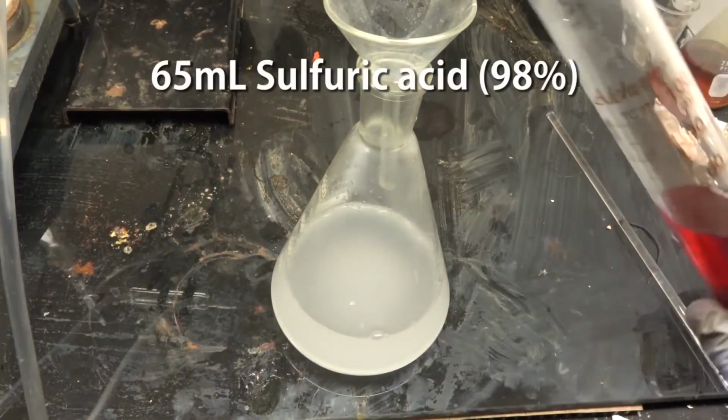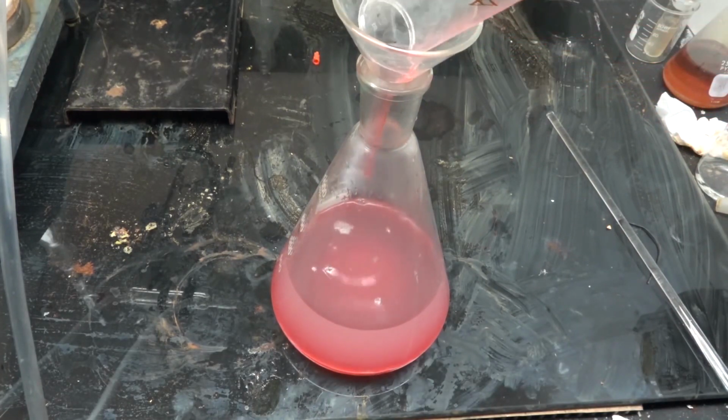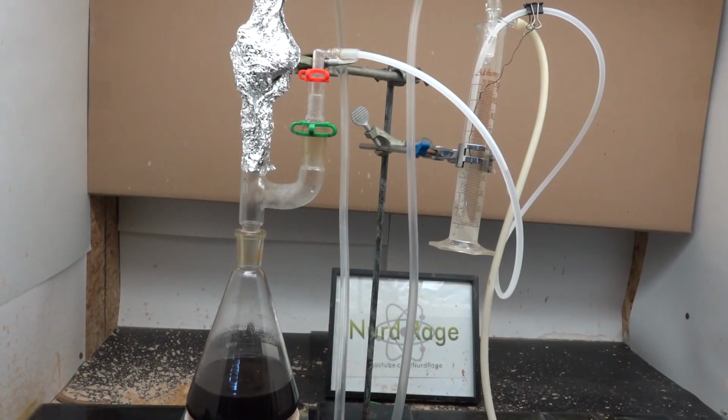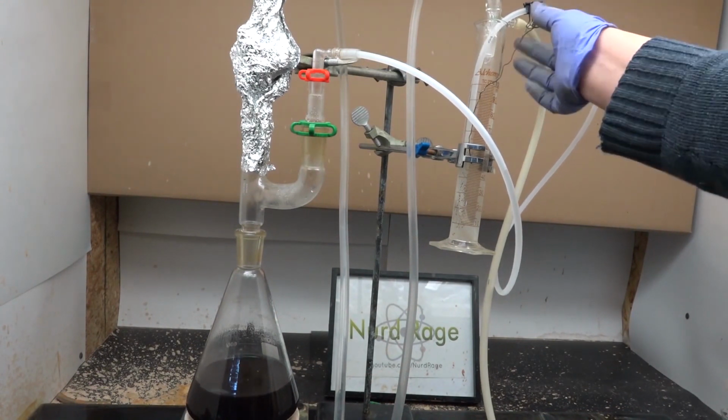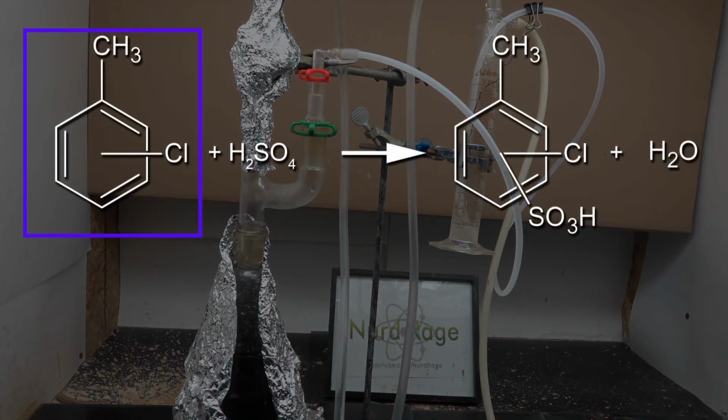Now add about 65 milliliters of concentrated sulfuric acid. This corresponds to a 1/3 molar equivalent. Now set up a Dean Stark apparatus around the flask operating in heavy return mode. Now turn on the heating to 300 degrees Celsius and let boil. What we're doing is sulfonating the chlorotoluene and releasing water.